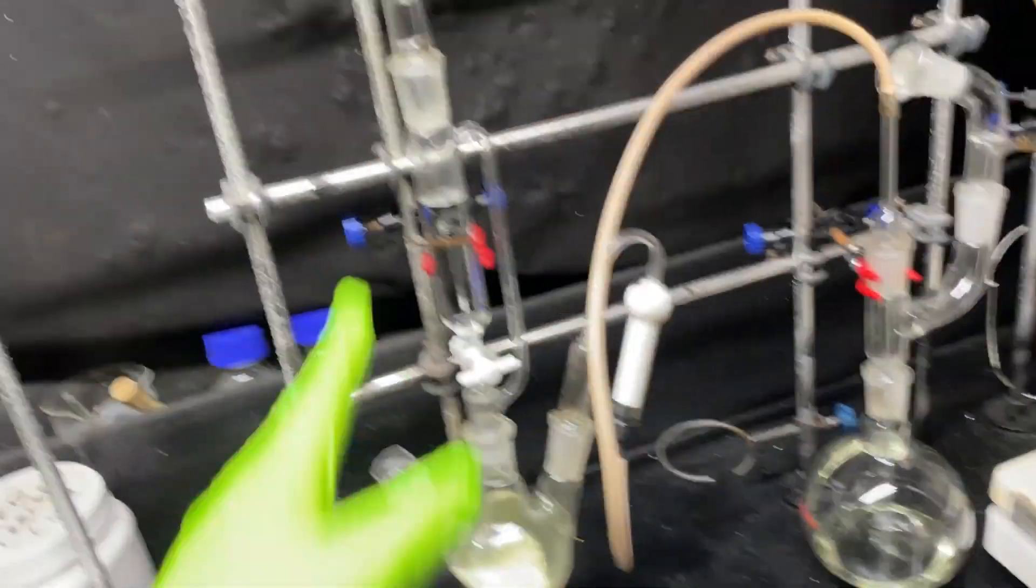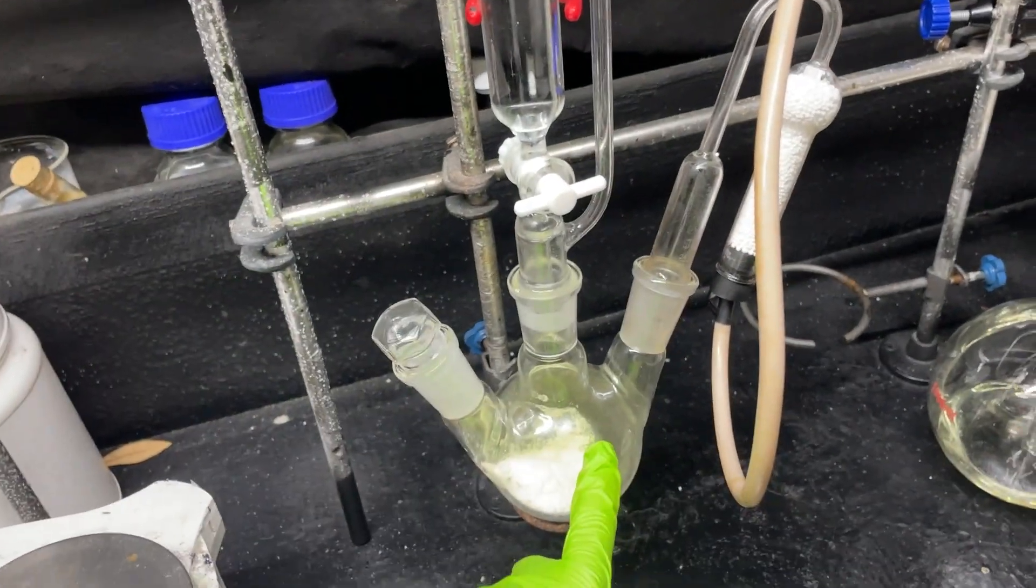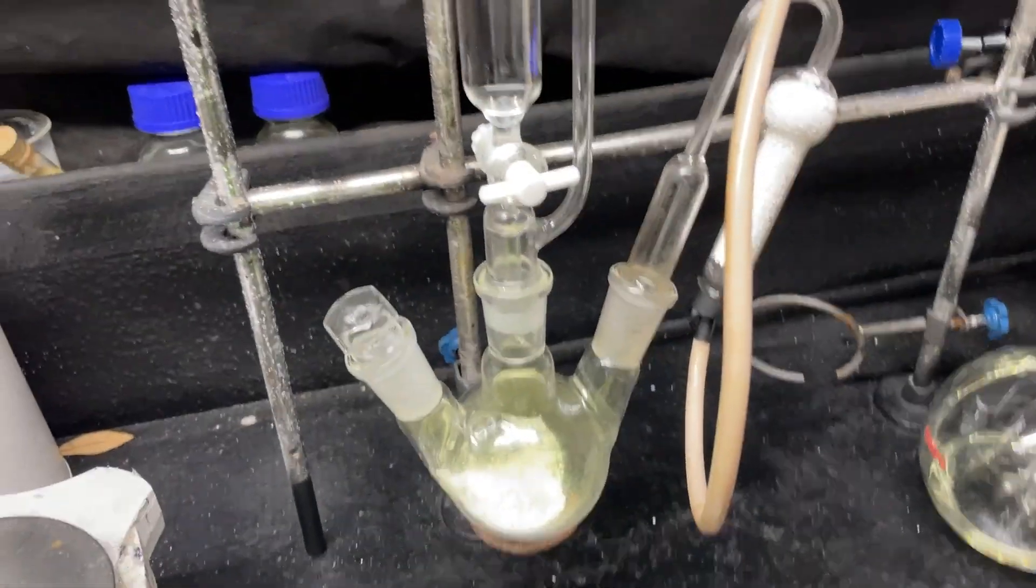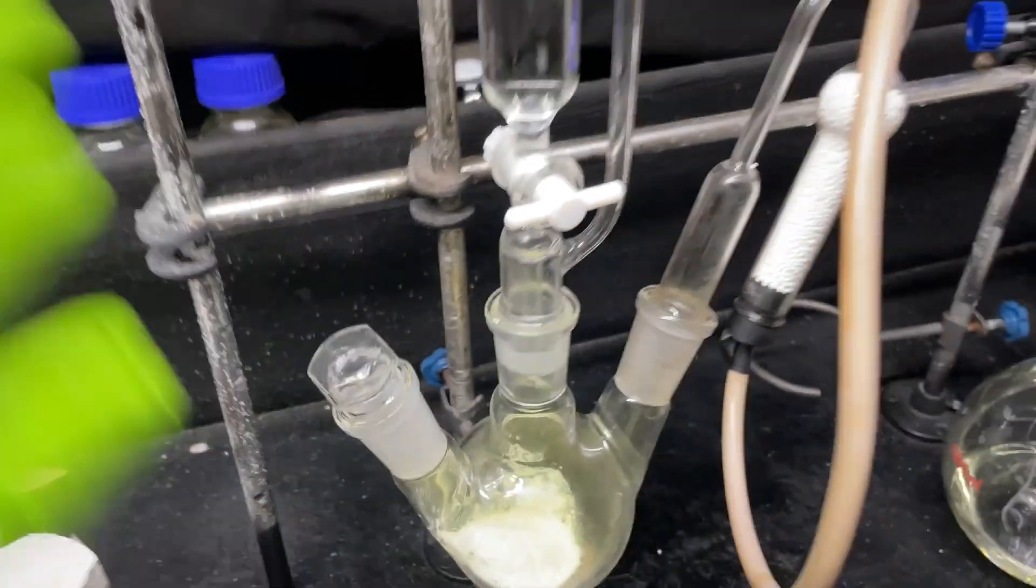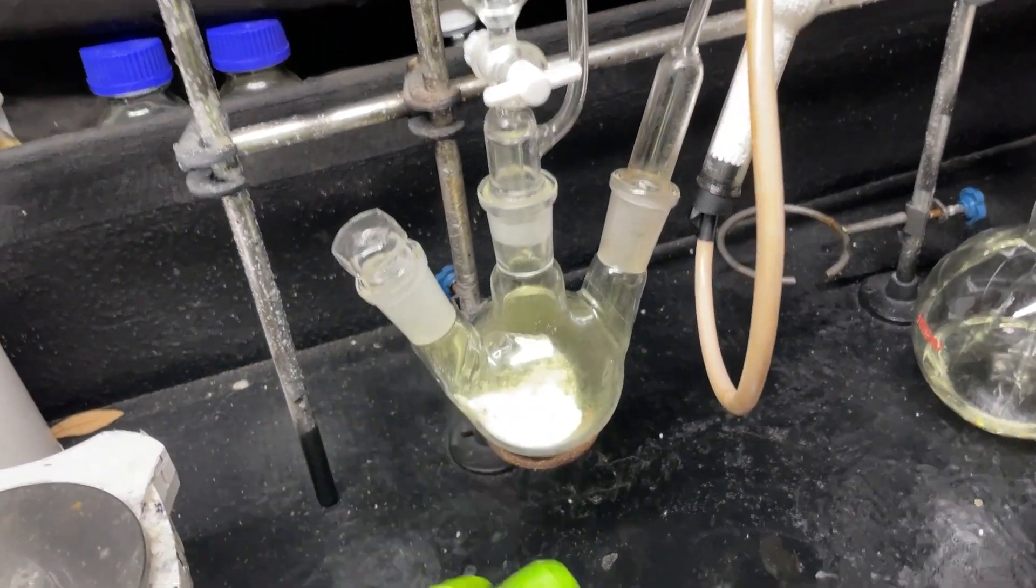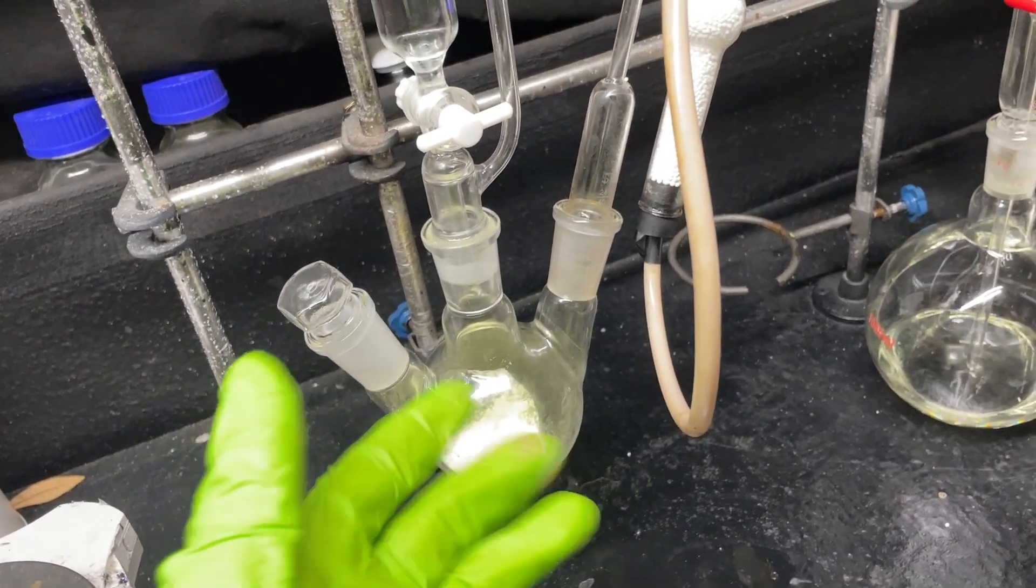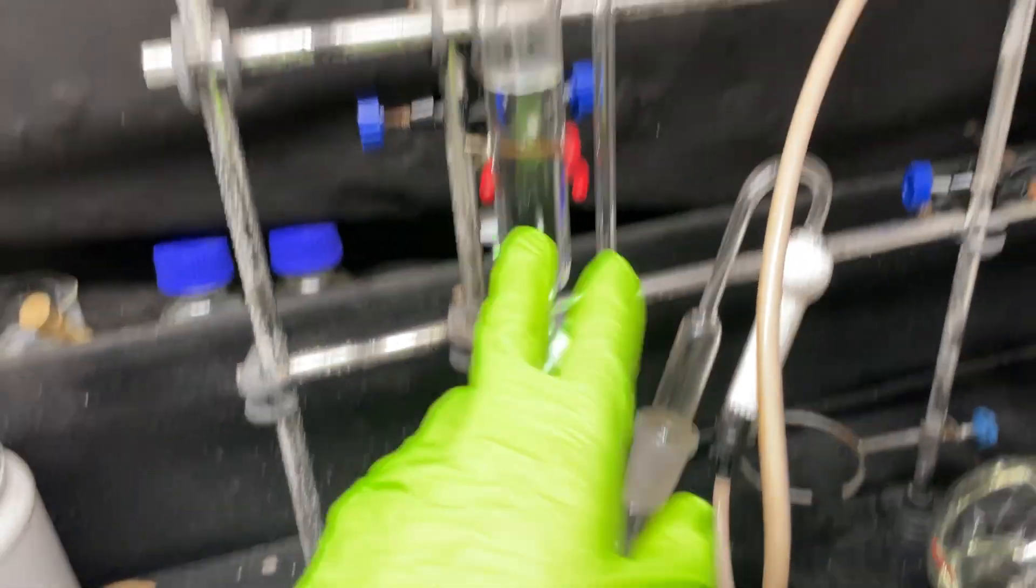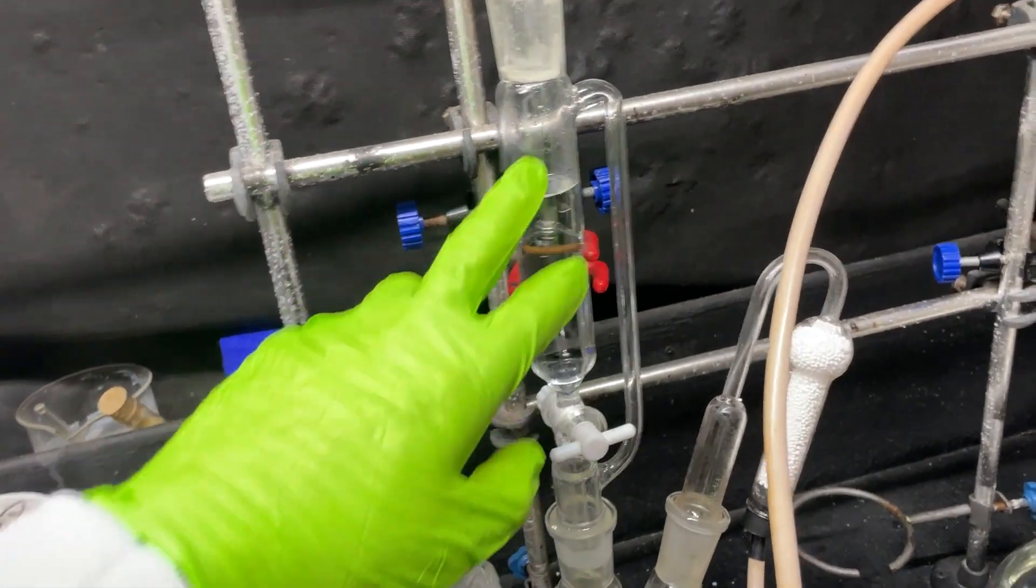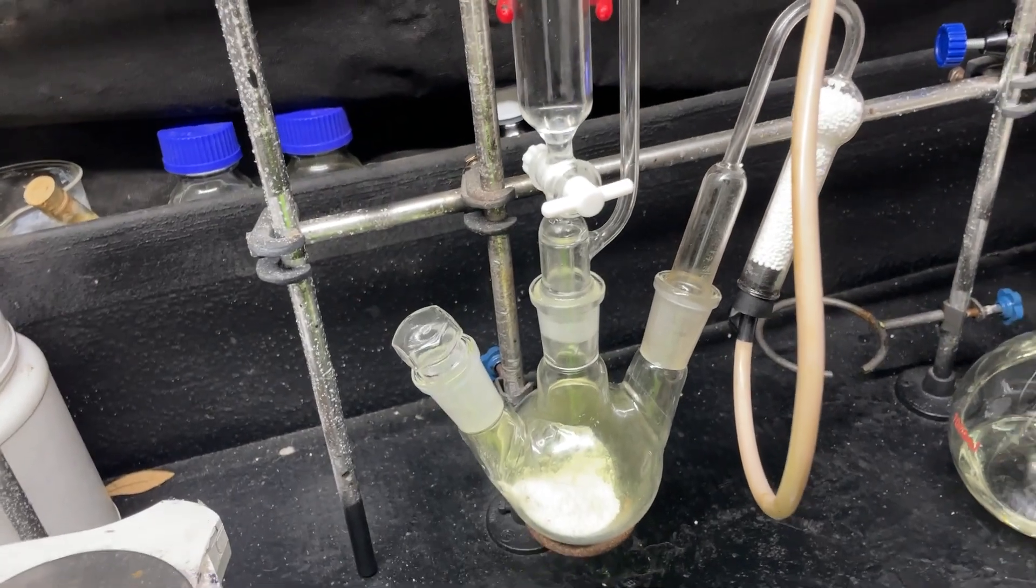So what is this whole contraption doing? Well over here we have a chlorine gas generator. That yellow gas you see in there is chlorine. Chlorine is an element but it was also used as a chemical warfare agent because it's highly reactive. So when you breathe it in it destroys your lungs - not a good way to go.